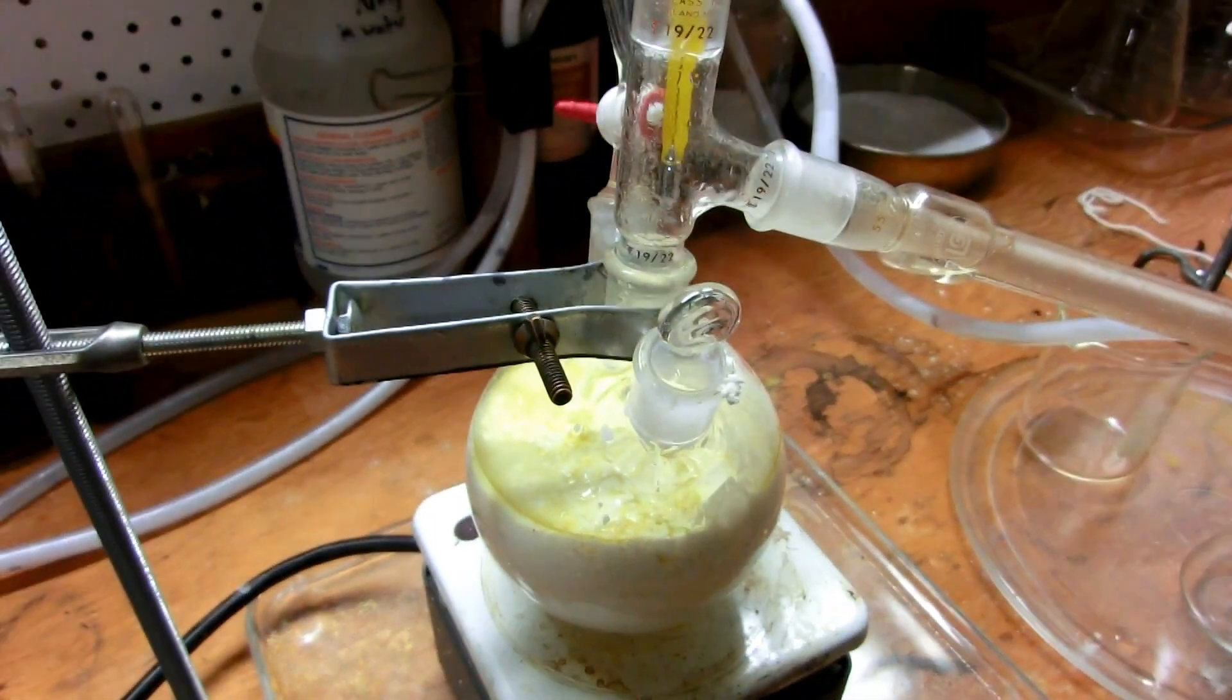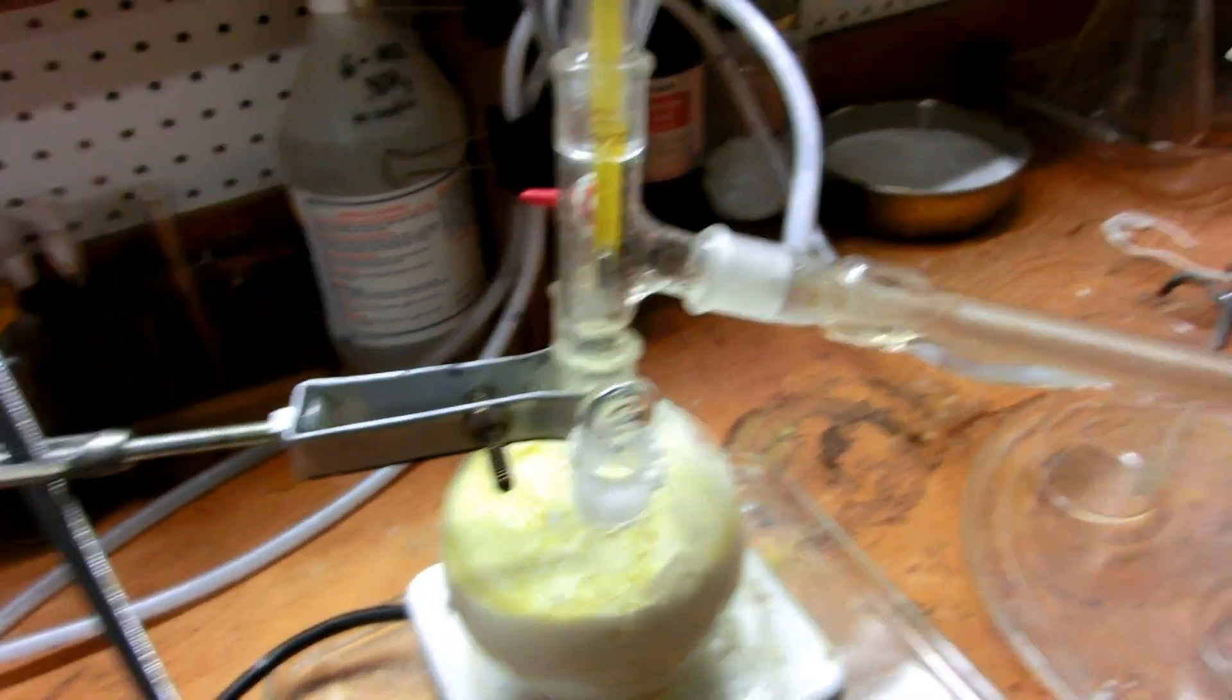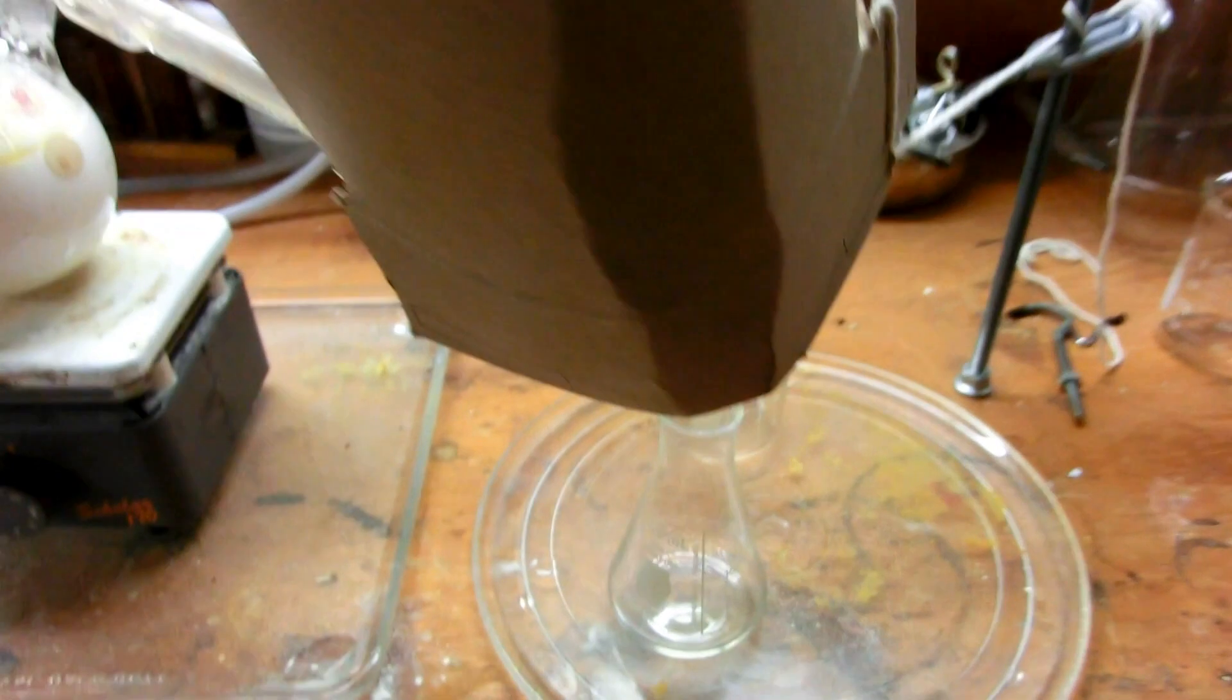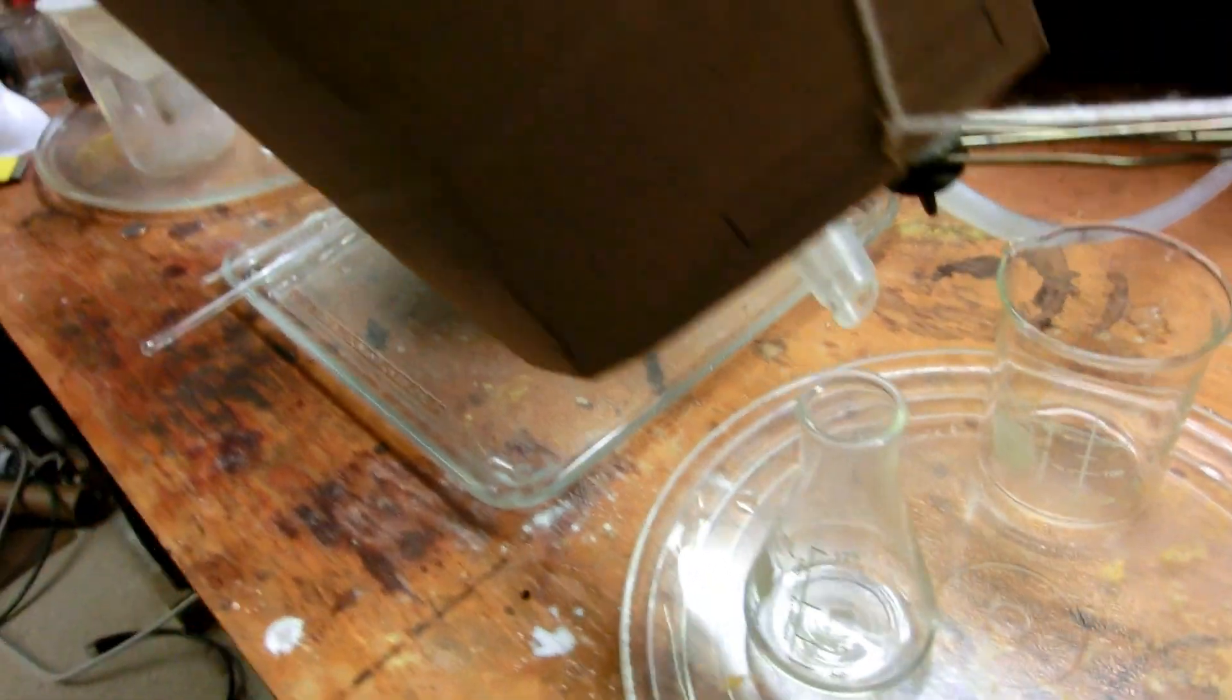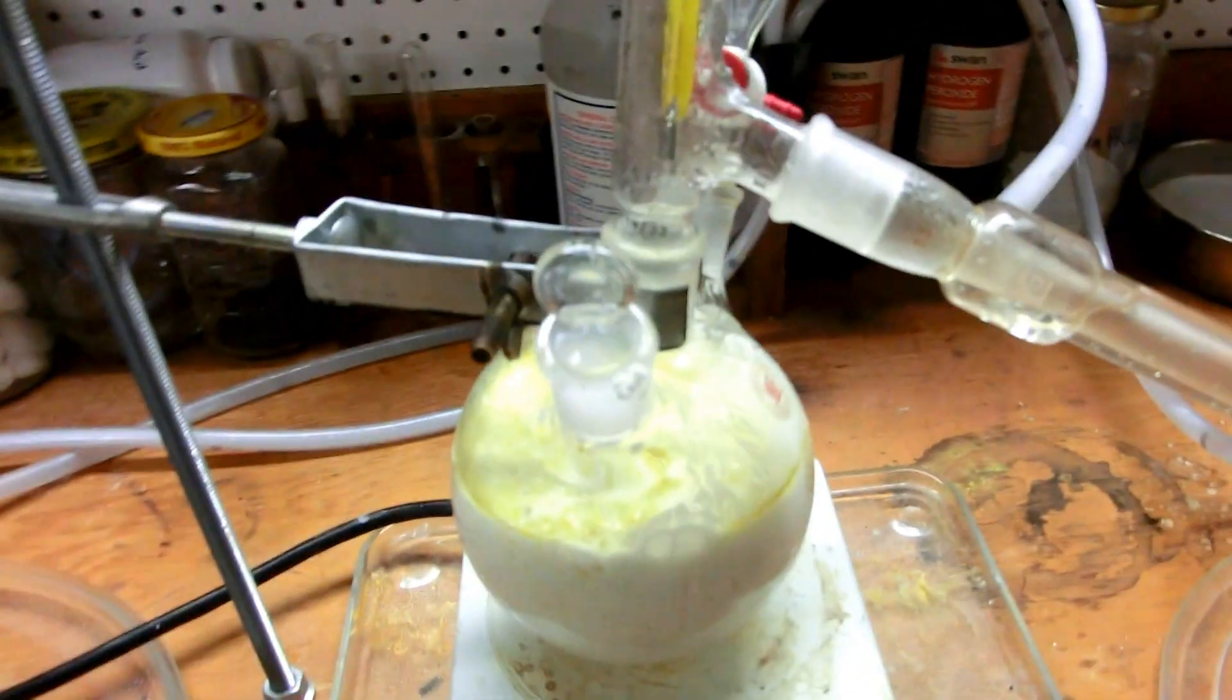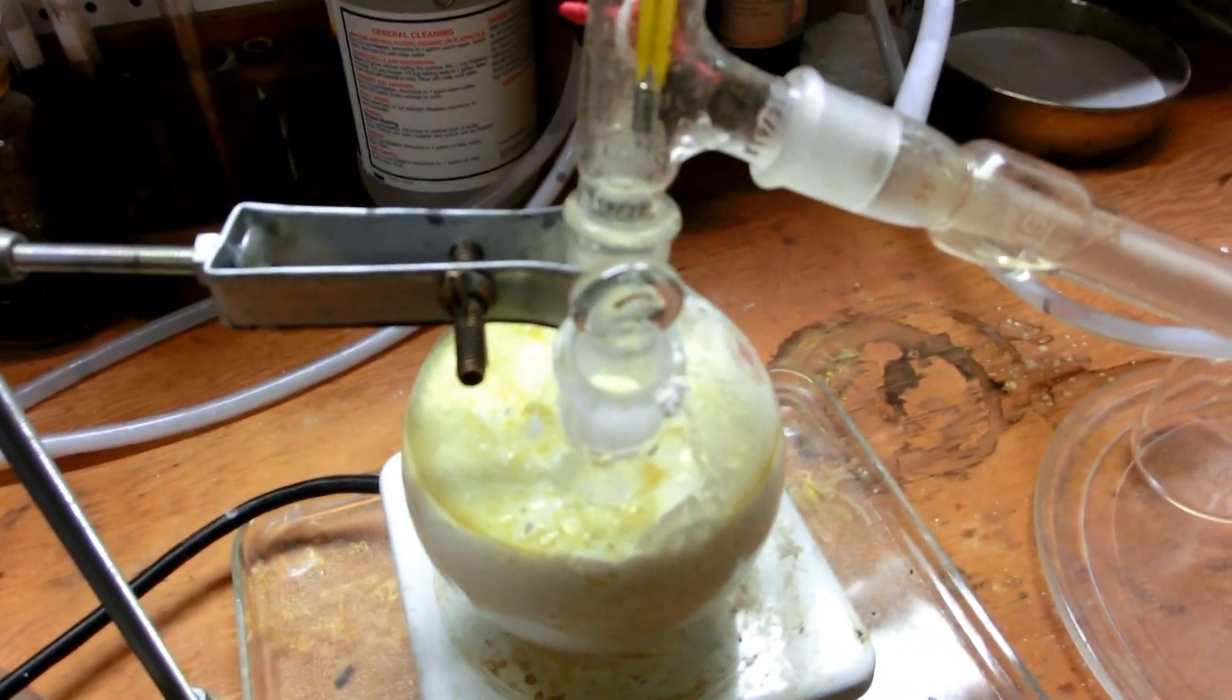You can actually do this indoors. I've got my fume hood all set up here with a little extra suction tube addition, but that's just for nitric acid vapors. I'll come back to the part where then I switch the flasks around.